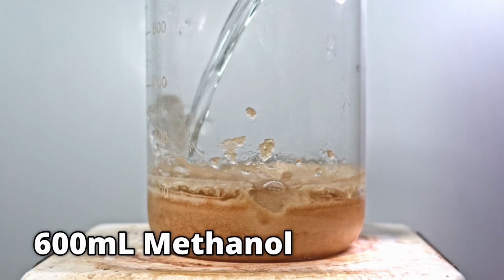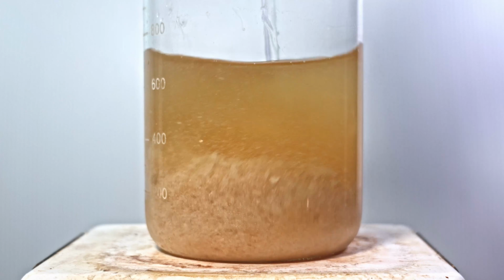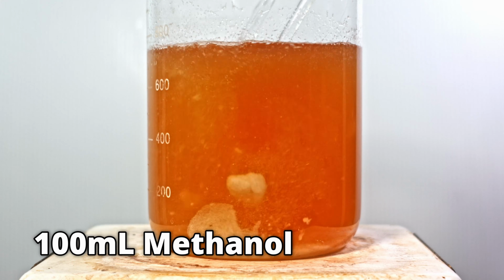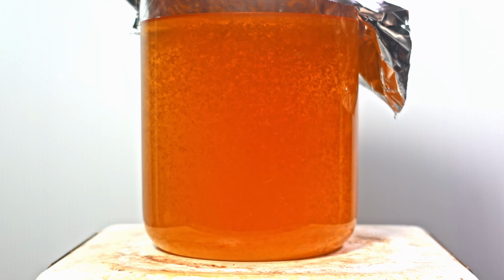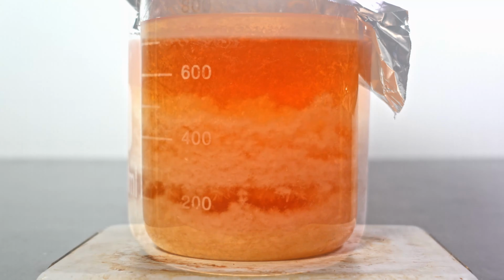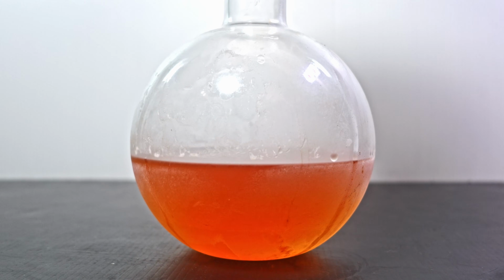I add 600 milliliters of pure methanol to break up and dissolve the cake. An hour later, a bit of salt still lingers, so I add another 100 milliliters. I ended up adding a second 100 milliliters and sealing it to prevent the methanol from evaporating. When I freeze it, 2 salt cakes crash out. I decant off the juice and set it aside.